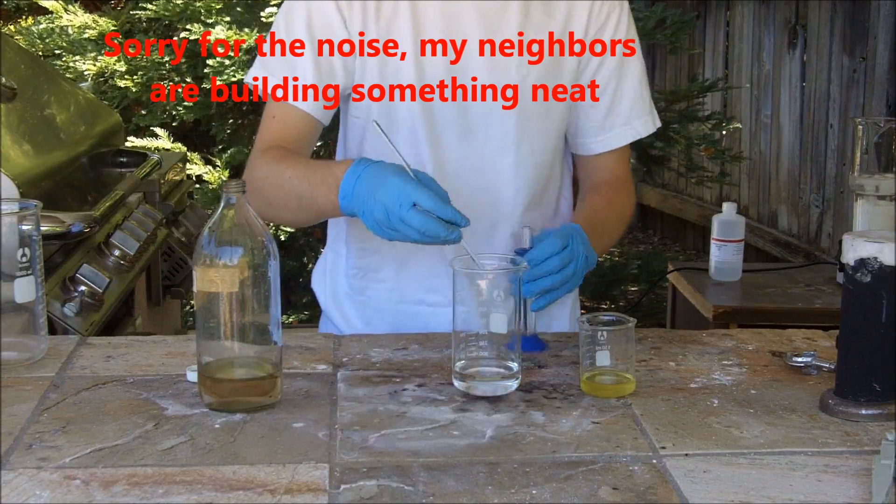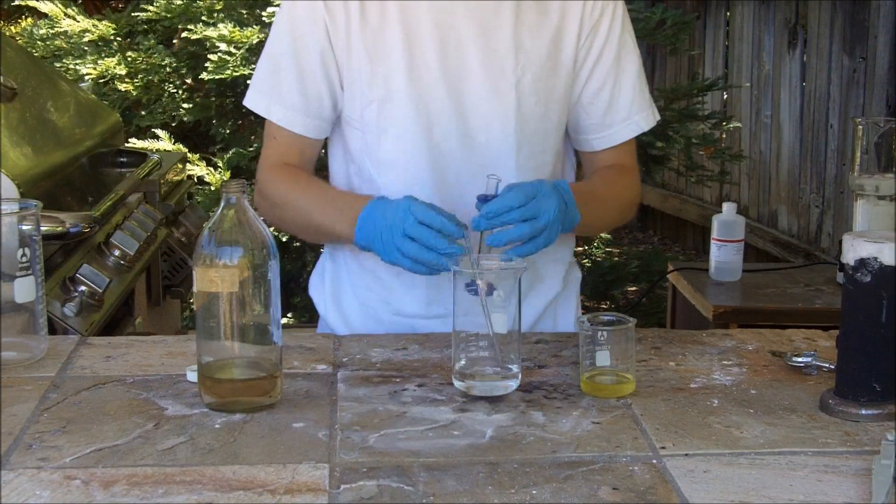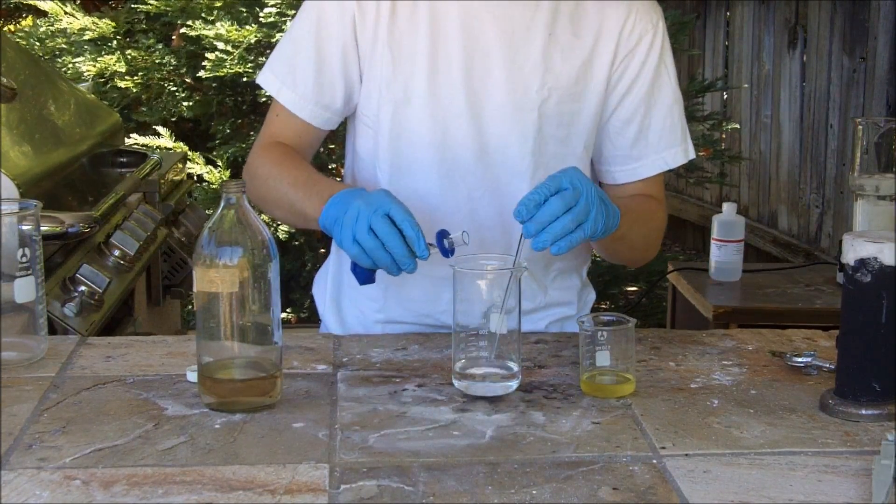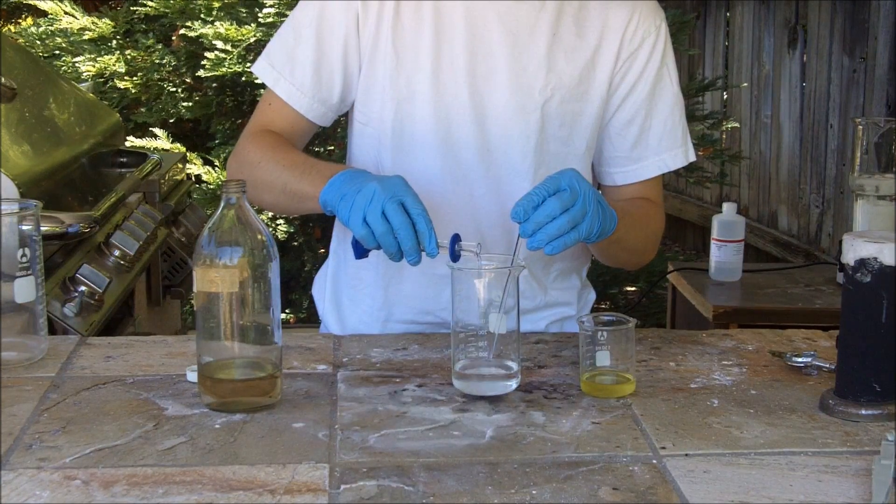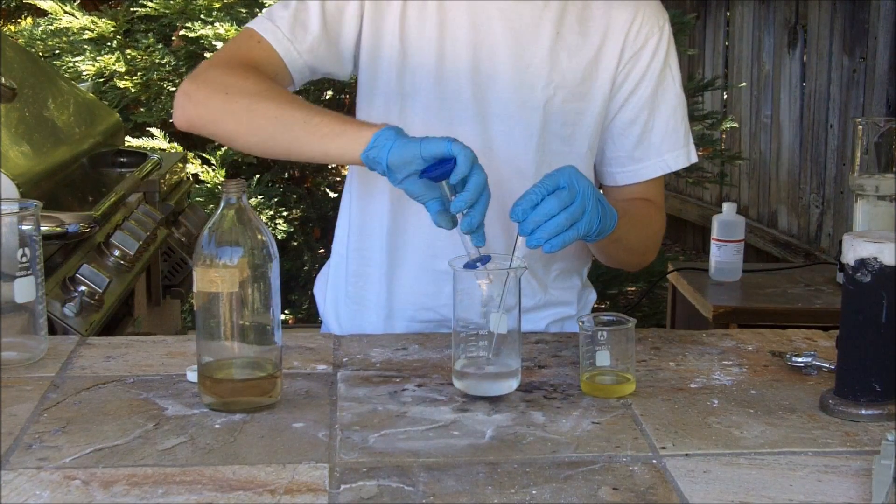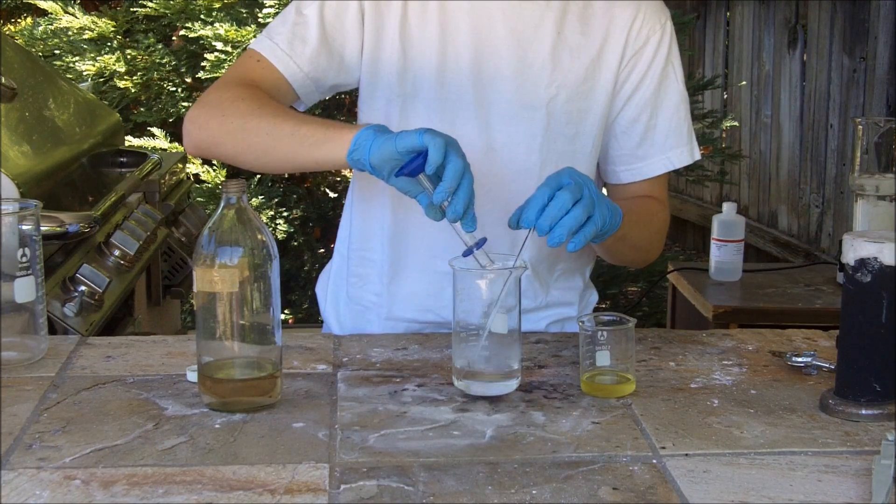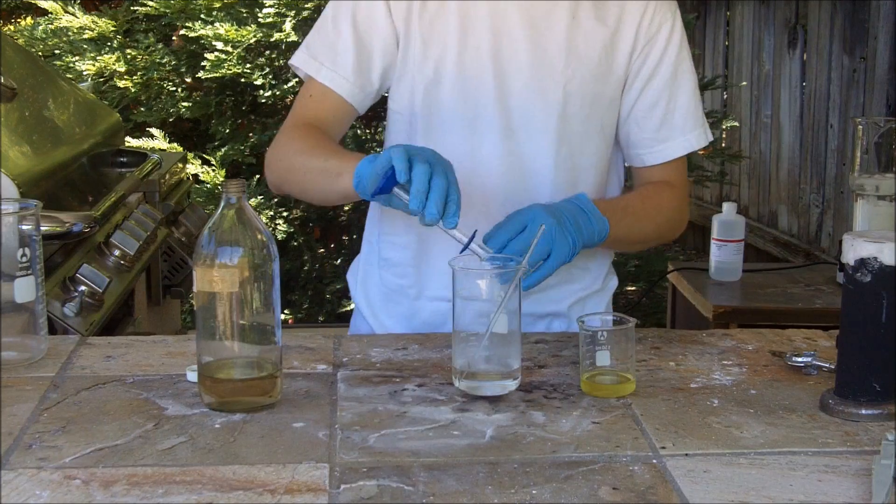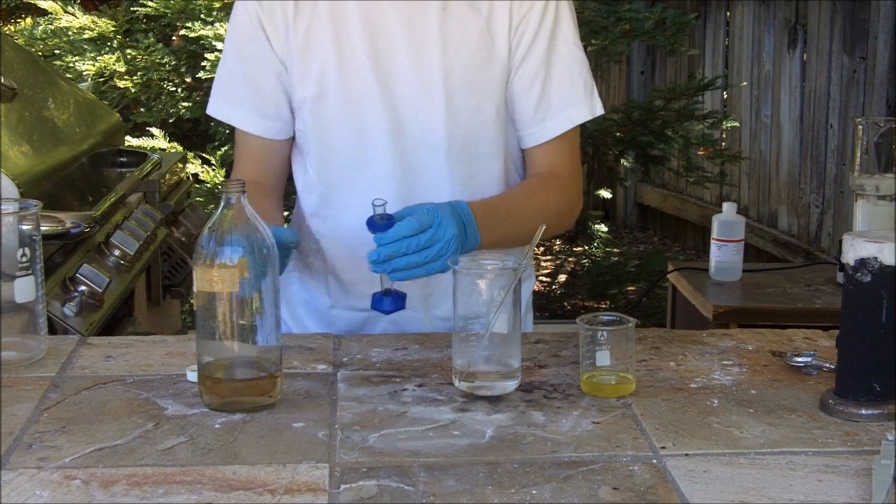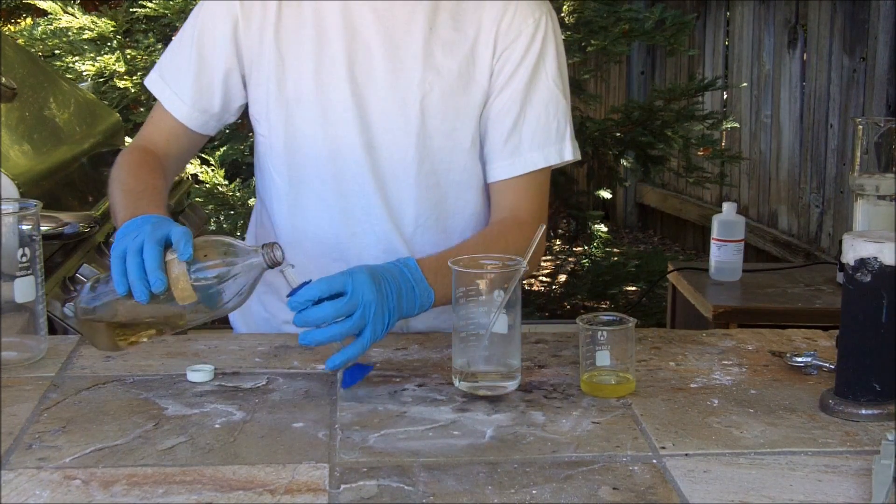I am going to get a stir bar. All right, the solution will get very hot and possibly start to boil with a little bit of fumes. I am going to add 10 more milliliters.